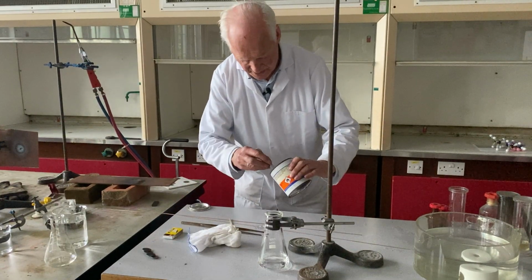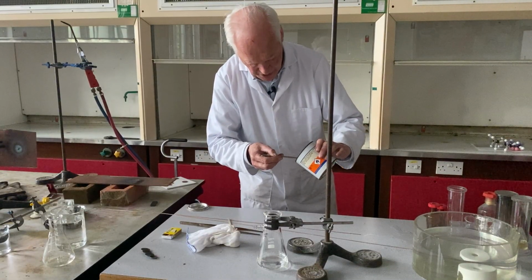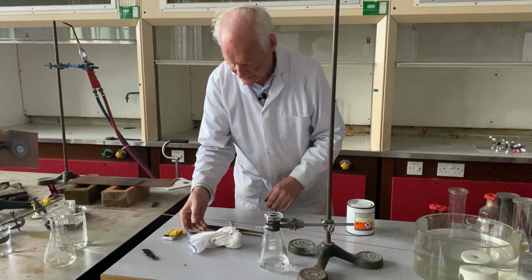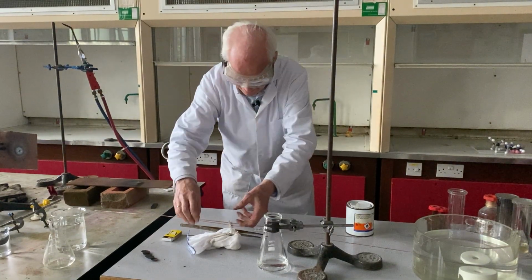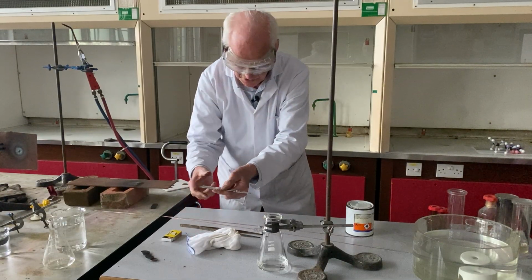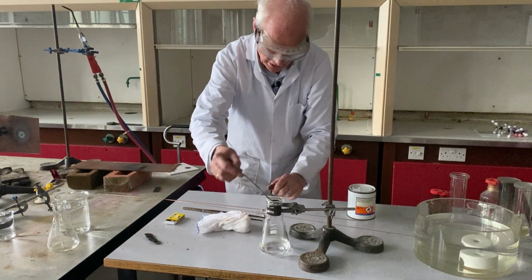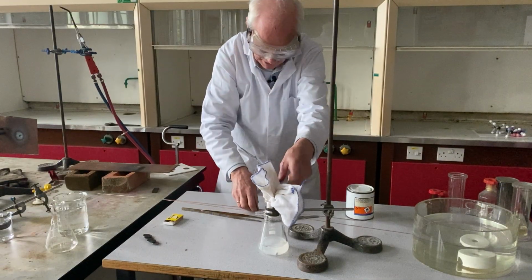So, taking a couple of pieces here, let me just pick up 2 pieces immediately, get the right number. There, we have 2 pieces here. We have to be prepared for rapid action. Before I do that, safety precautions. One never knows. As I said, these air mixtures burn with extreme rapidity. So 2 pieces, you'll notice immediately it's starting to froth, and immediately I will put the plug of our cleaning cloth there, plug this in now, and then I shall apply very rapidly a flame.